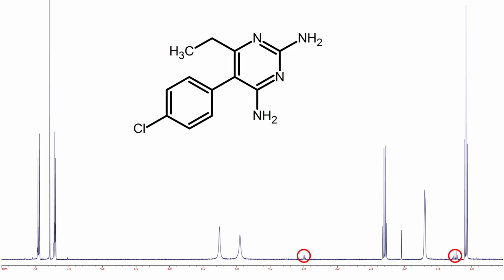This is leftover contamination from when I washed the final product with diethyl ether. This tiny little peak here is not supposed to be there. It's some sort of contaminant. It looks like acetone, but I can't be sure. It also doesn't make very much sense to be acetone since I never used acetone in the final steps.